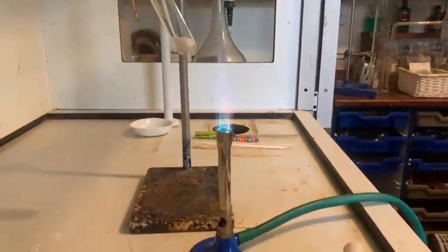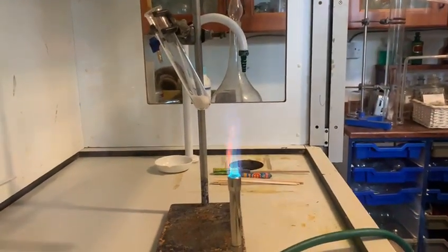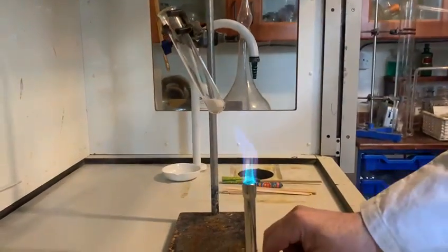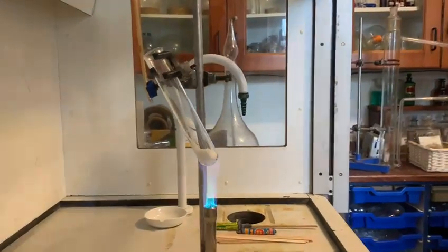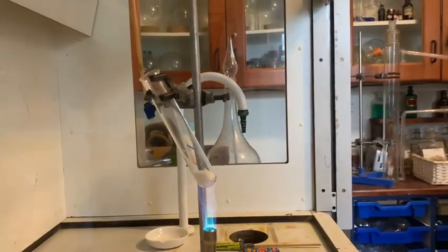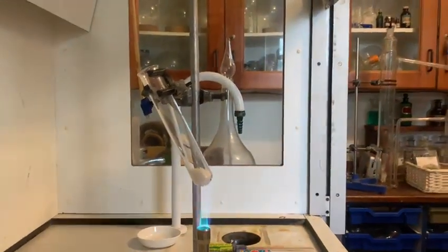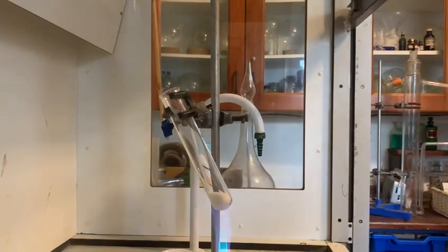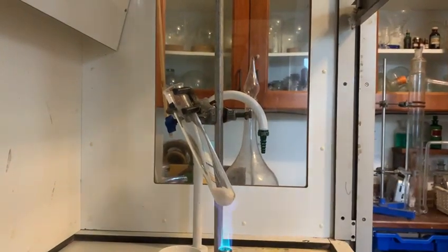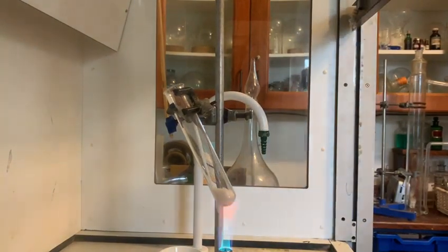What we're going to do is put some potassium nitrate in this little boiling tube, heat it up and melt it, and see why potassium nitrate is used in gunpowder — because it likes to give up its oxygen very easily. And why carbon is used in gunpowder, and why specifically sulfur is used. So we're going to heat this up, it's going to melt, it's going to give off oxygen, and then we're going to see what happens. I'll put up the gas here.